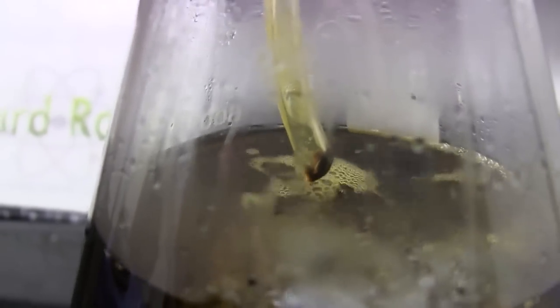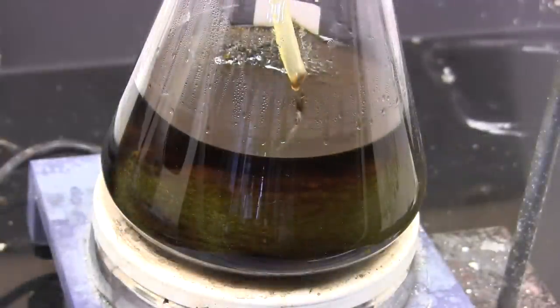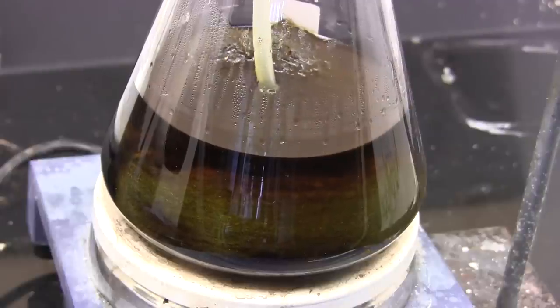Okay we're halfway done and the toluene seems to dissolve the polyethylene tubing. I'm not too worried though as we'll be distilling this reaction mixture later. You can avoid this by using polytetrafluoroethylene tubing or PTFE tubing. I'm just going to push the tubing further into the reaction and keep going since this tubing is cheap.